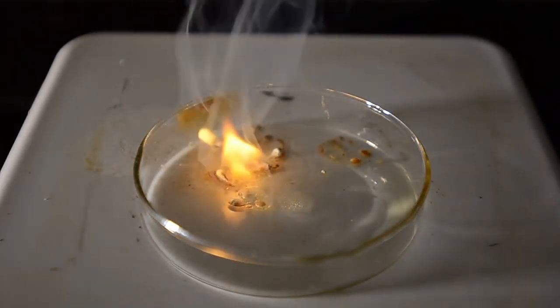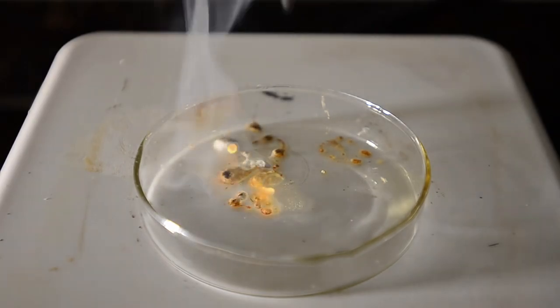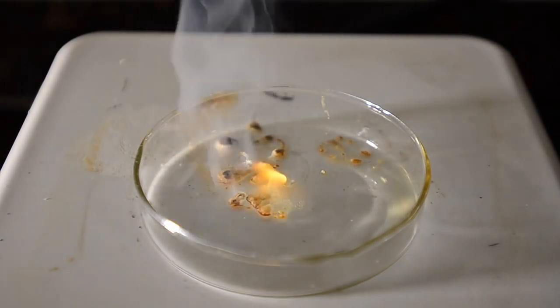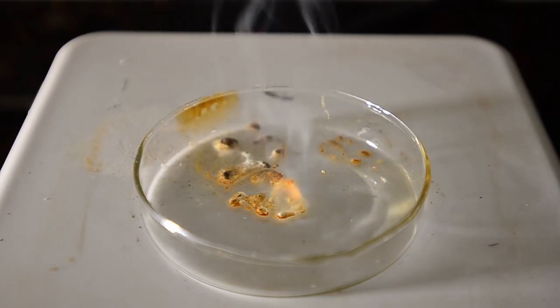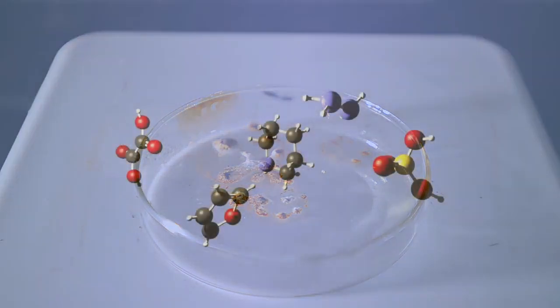The hot plate is only at about 150 degrees C, so this is a good warning about the reactivity of this compound. Huge clouds of white phosphorous pentoxide are generated as the phosphine gas produced spontaneously combusts in air. Stay tuned.